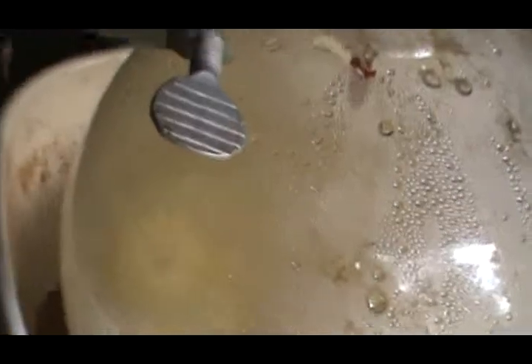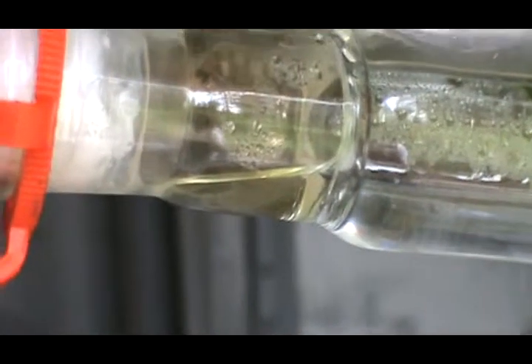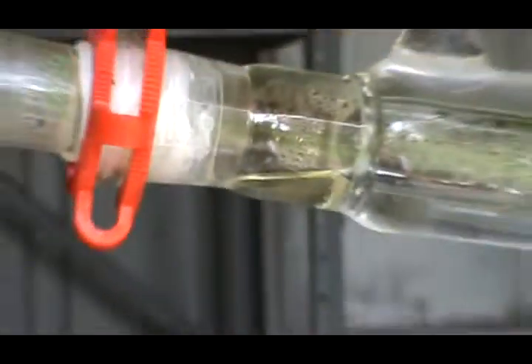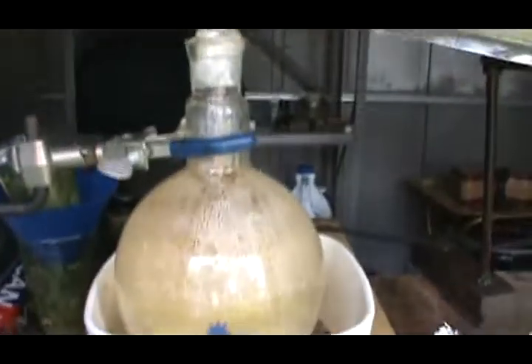I took the tin foil off, so you can get a look at the receiving flask, or the boiling flask. You don't want to add too much sulfuric, or else it'll carry over some sulfuric acid. The color of the acid has now changed from a red to almost a white, so you know that it's getting close to being done. I started to get a little too hot, so I had to take off the tin foil.